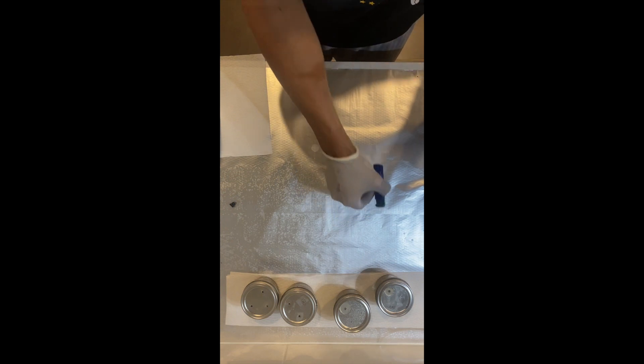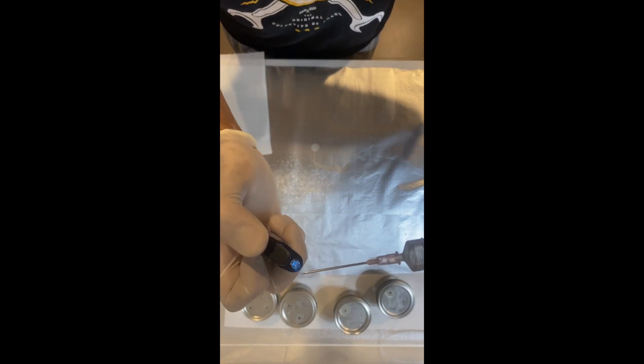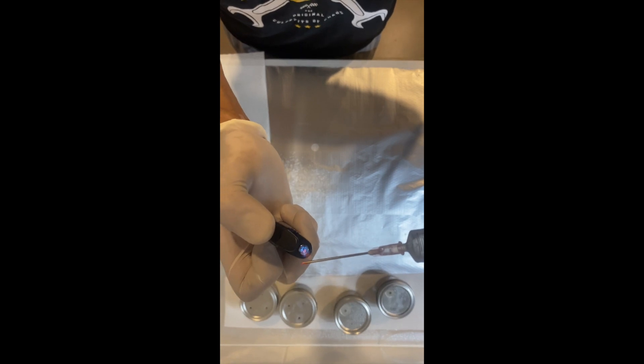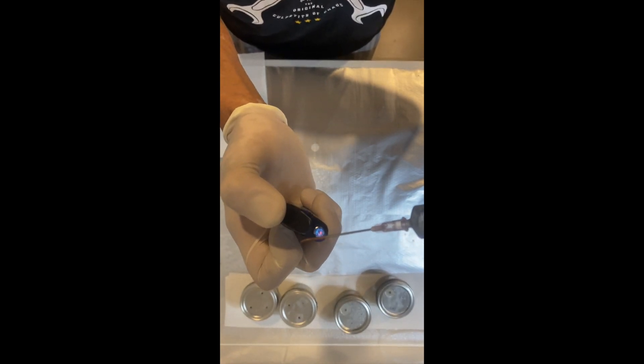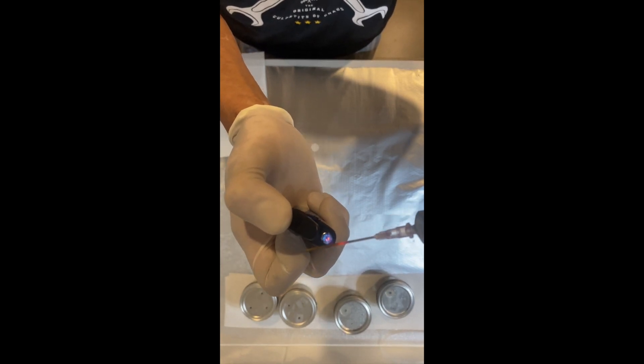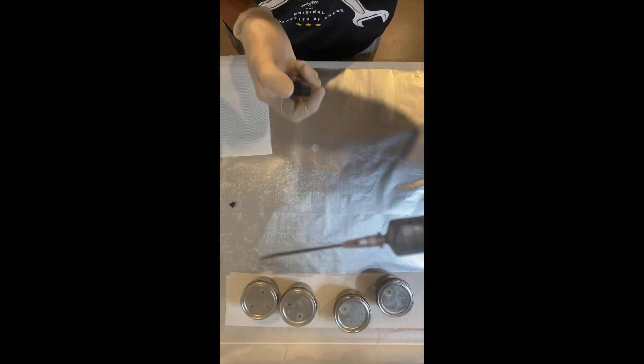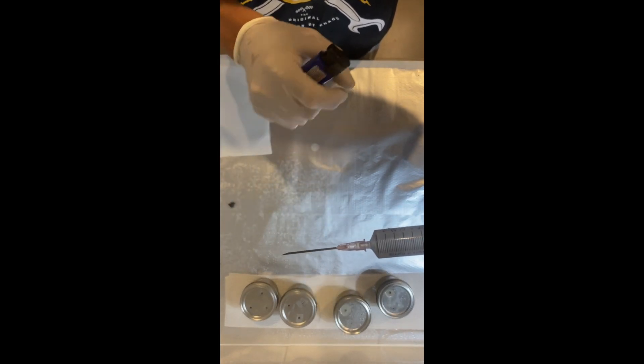Cap off. Now we're just going to get, just like our scalpel from the other video, I'm going to heat, heat, heat until it goes a little bit red. You might hear it sizzle from a bit of the liquid in there. That's fine.